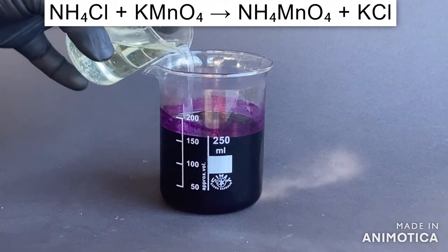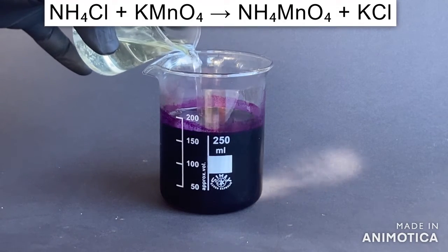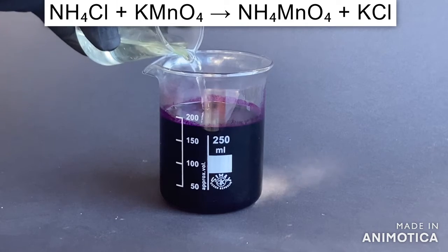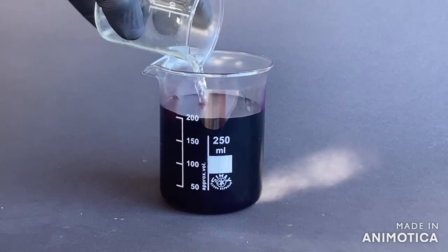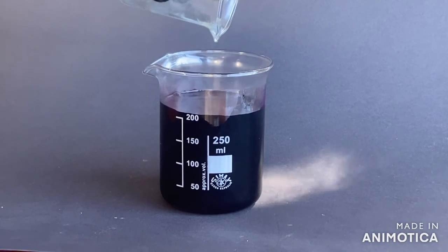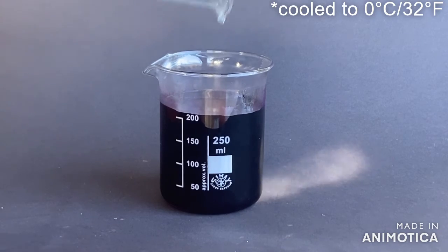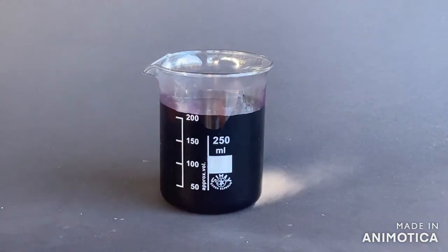The potassium permanganate reacts with ammonium chloride to form ammonium permanganate and potassium chloride. Now I will cool the beaker to around 0 degrees Celsius. Meanwhile I'll assemble filtration apparatus.